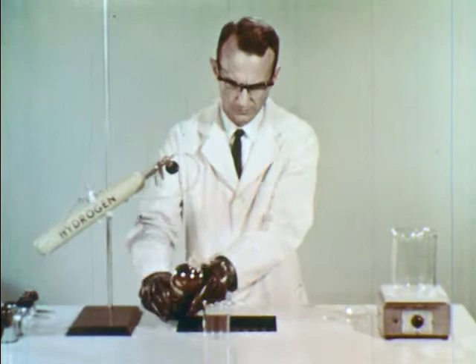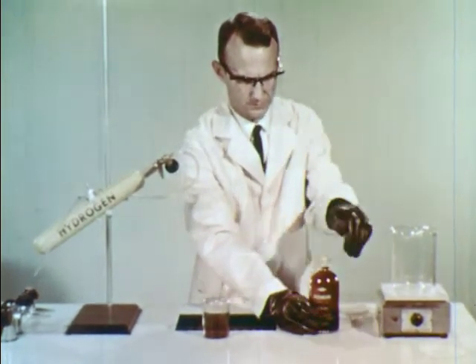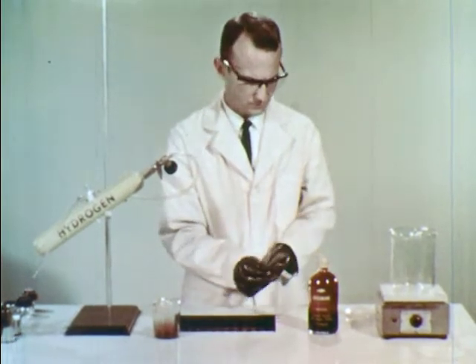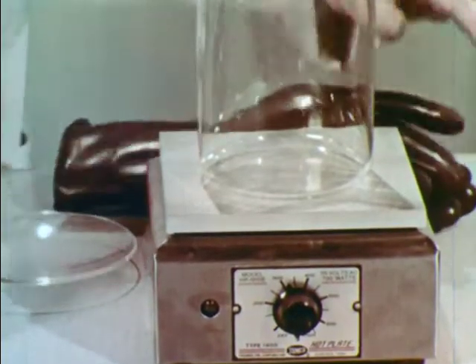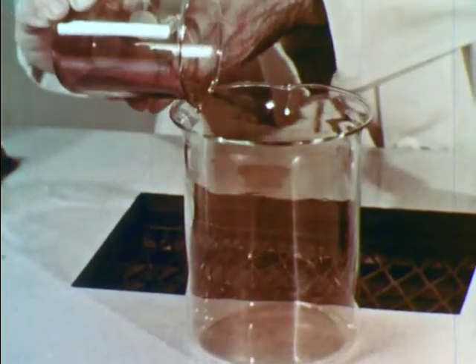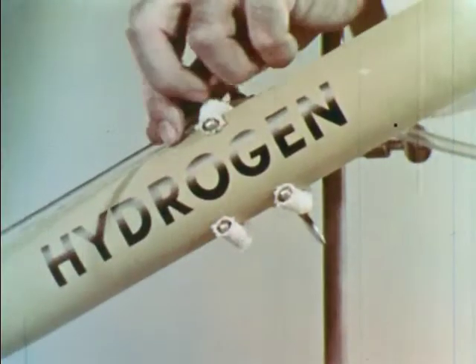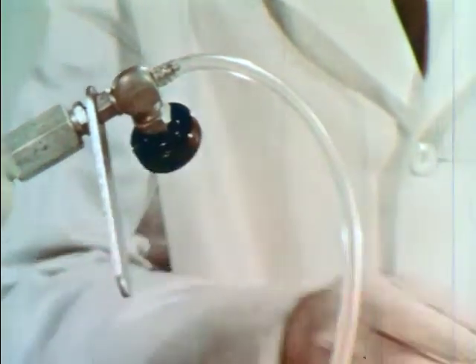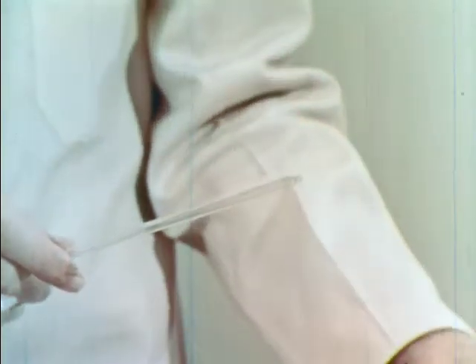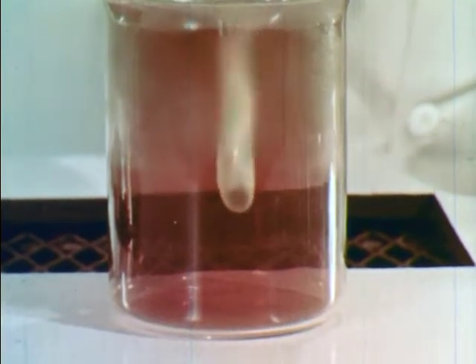Now let's see how bromine reacts with the element hydrogen. We pour out a sample of bromine. Since we will be dealing with gaseous, not liquid, bromine in this experiment, we can dispense with the gloves. A large beaker is heated so that when bromine is poured into it, the liquid vaporizes and fills the beaker with gaseous bromine. The hydrogen is turned on and lit. In the air, the pale blue flame of burning hydrogen is hard to see, but the flame continues to burn in the bromine vapor. Hydrogen reacts with bromine, forming hydrogen bromide.